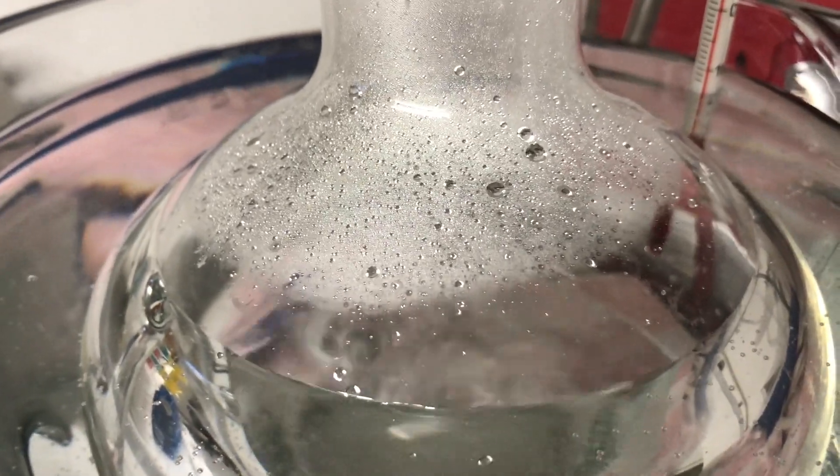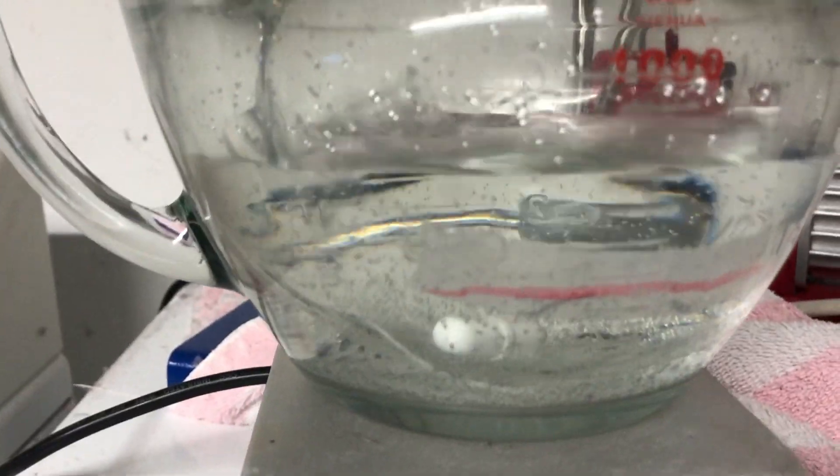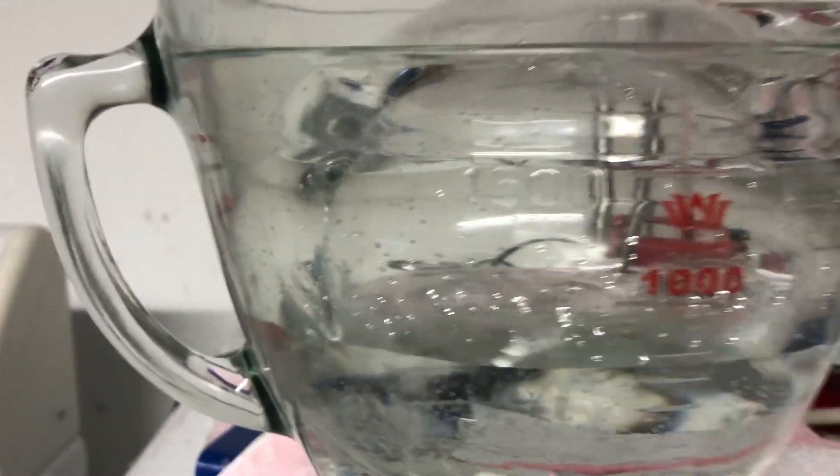It was still holding the vacuum. So just not even 50 degrees. And you can see it's boiling in there. So I turned the stir off. So you never hold the good vacuum.